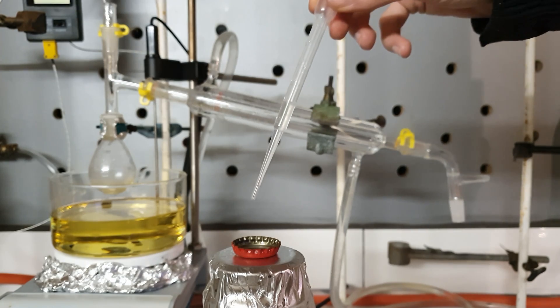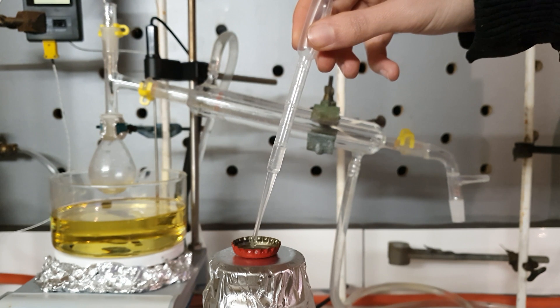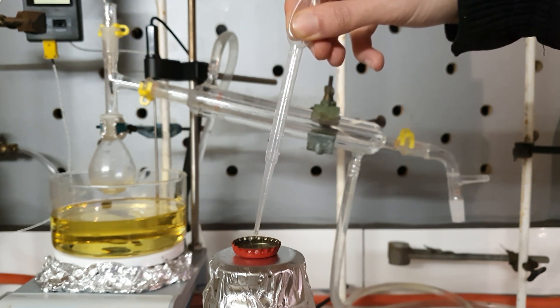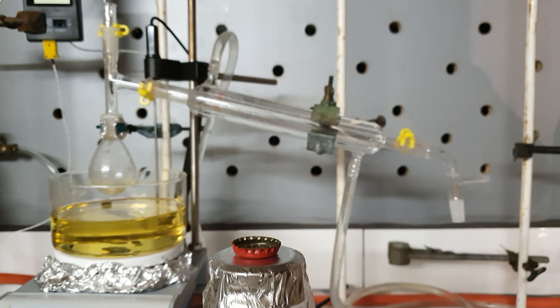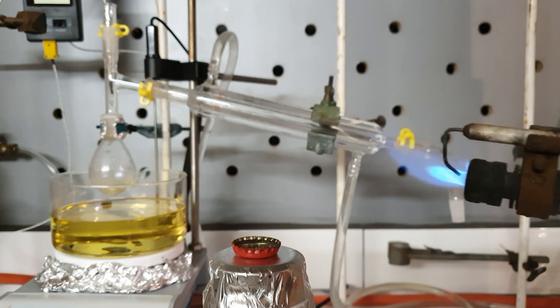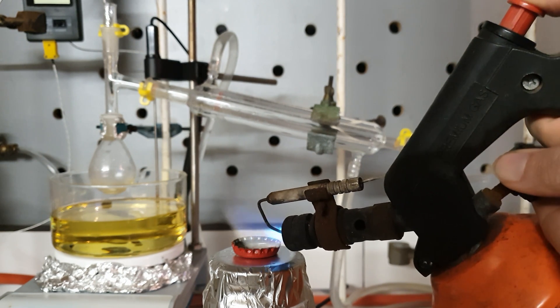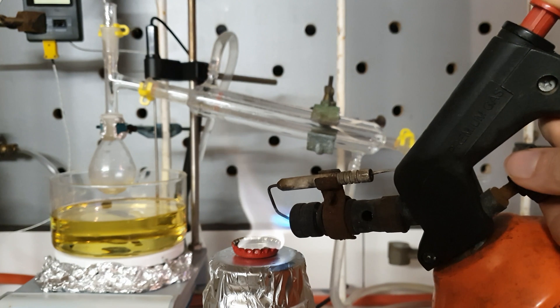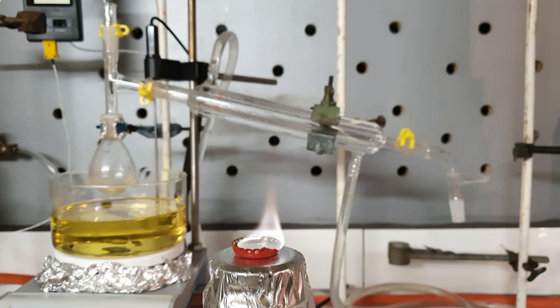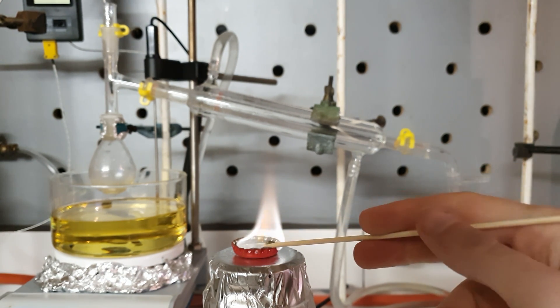Now comes the fun part where I had to test its burning properties. Here I placed a few ml of the compound in a steel cap and set it on fire. Honestly, it doesn't immediately catch on fire like ethanol or other solvents. However, once it happens, it burns with a very strange ghost color flame.